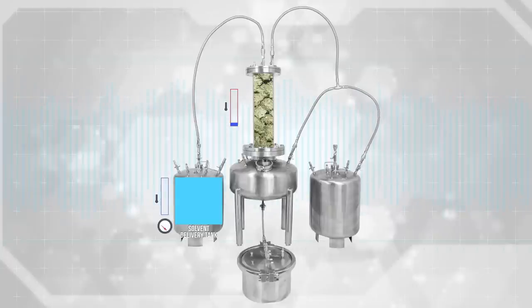Step 3: Begin extracting. After your solvent or solvents have combined and set to your desired solvent temperature in your solvent delivery tank, you can then use the heat input on the solvent delivery tank to create the head pressure to expel solvent from the liquid siphon line in the solvent delivery tank into the column of the plant material to prime with a full liquid saturation soak at any desired temperature for any length of time. Note: solvent temperatures will not increase by the heat used to create the head pressure so long as the solvent is allowed to expel from the tank during heat input.